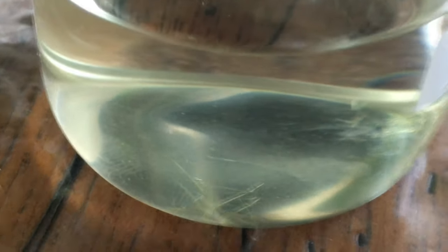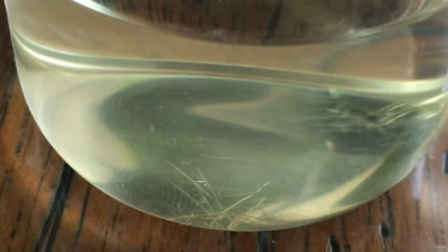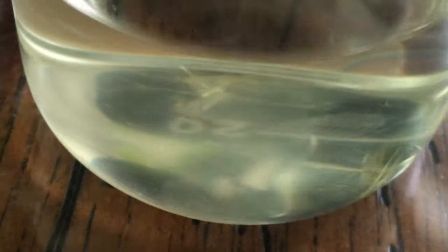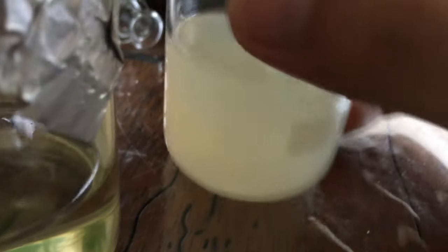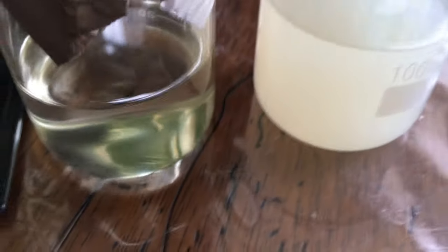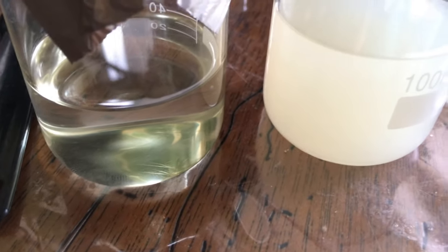Here are the needles from my first pull that didn't have a low enough pH. You can still see it precipitated some crystals and still growing a bit, so I'll be leaving this for another day or so. This is only 24 hours after, and it clouded nowhere near what this clouded. I'm pretty excited about the potential for this tech.